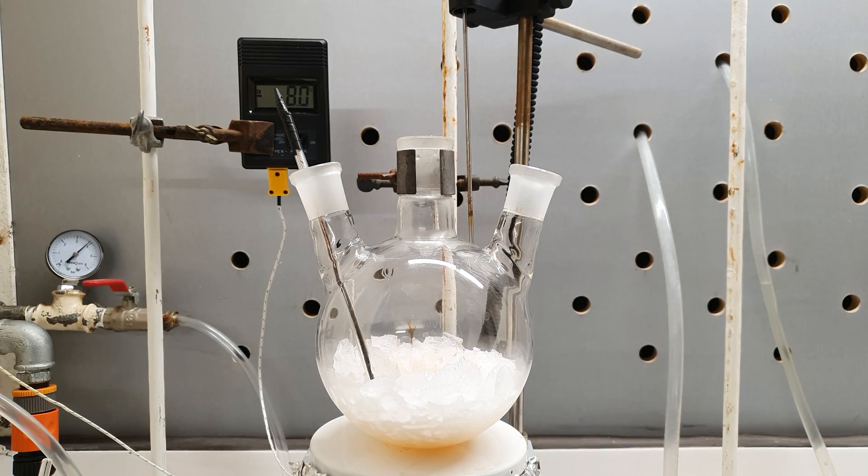The interesting thing here was that this mixture acted a lot like an ice-salt mixture. Even without mixing, its temperature dropped significantly below the freezing point of water, as you can see on the thermocouple reading.